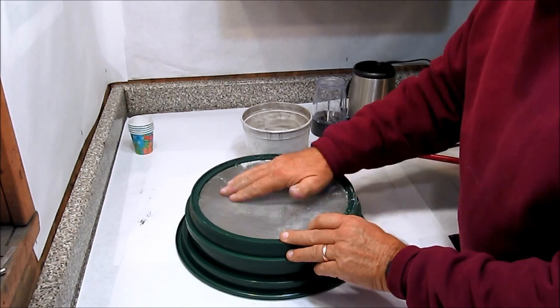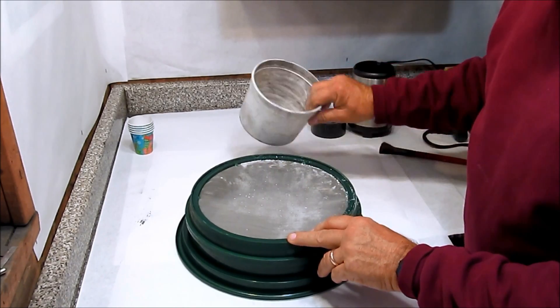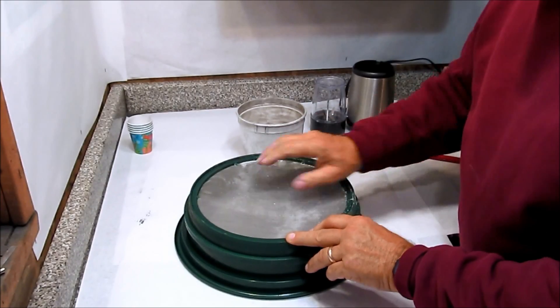So the fine potassium nitrate, if you get it, you can break up the clumps by simply putting it through the 50 mesh screen.